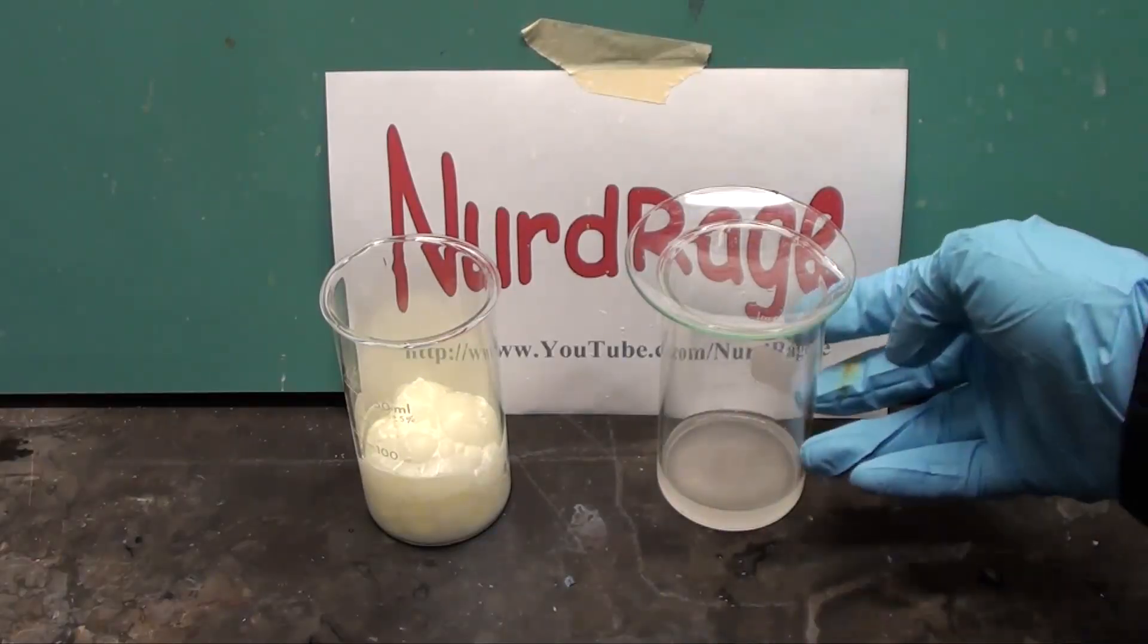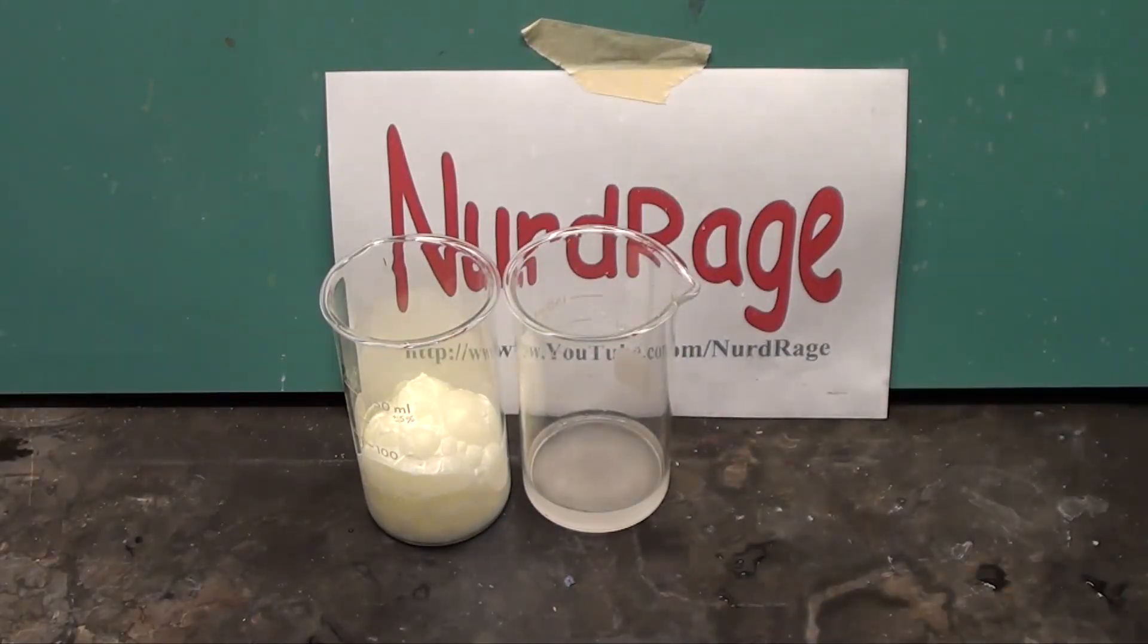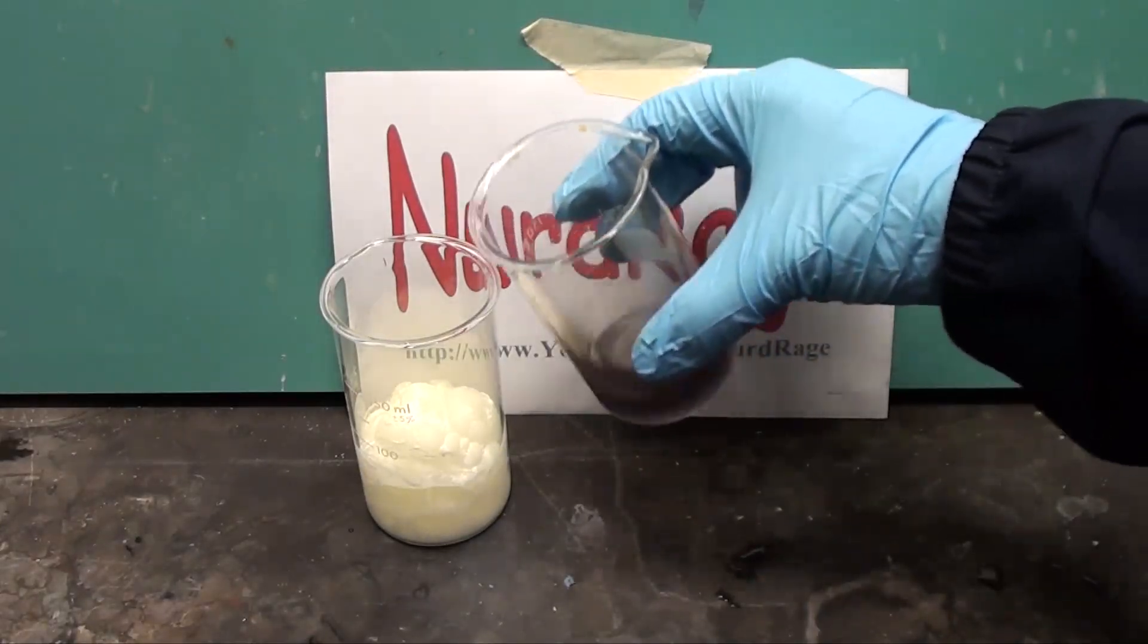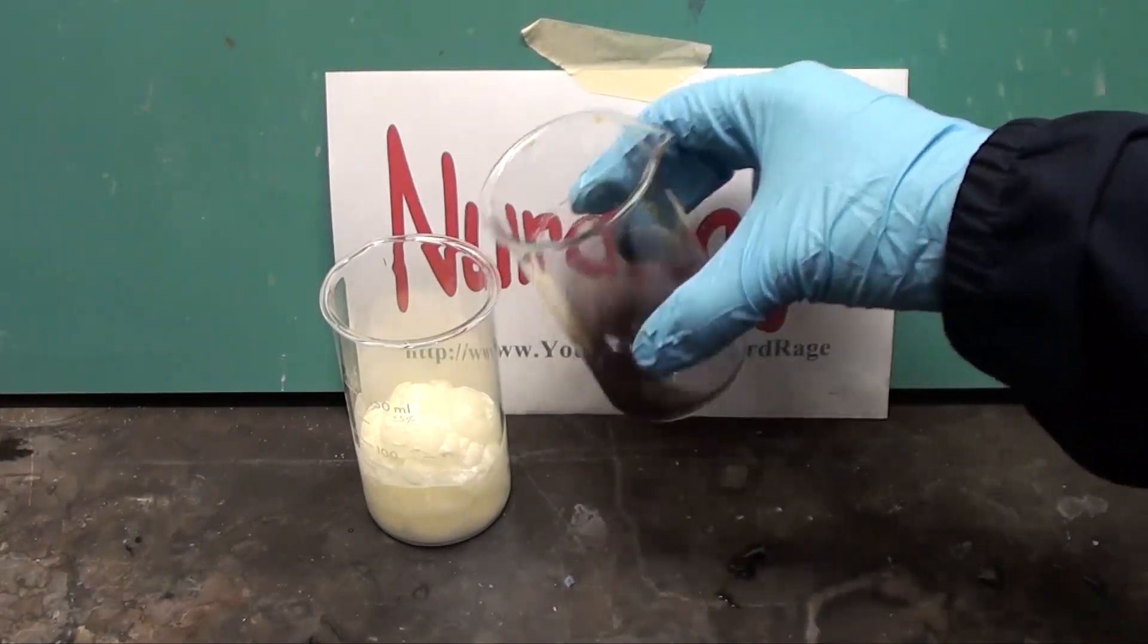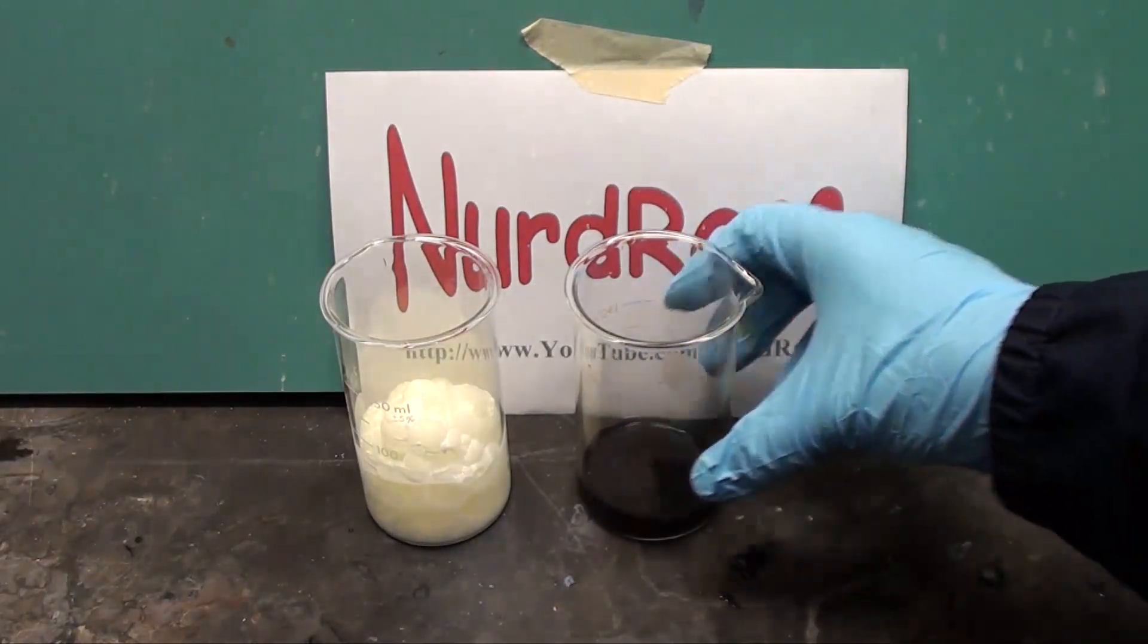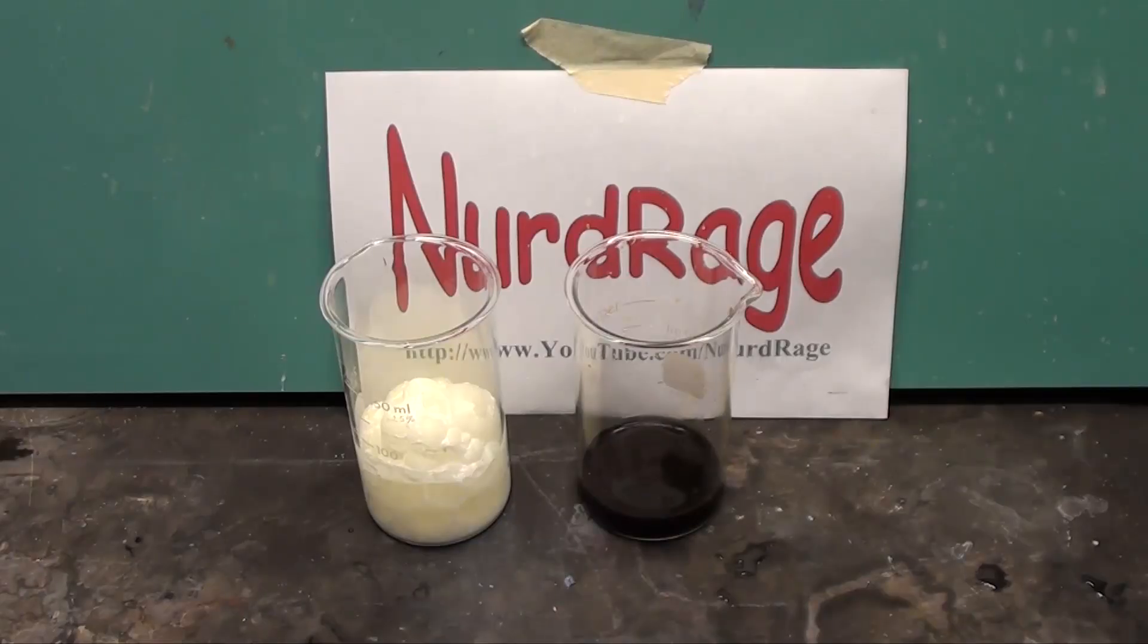Okay, I'm going to go a little further and let some of the chlorine fall into the tester solution. As you can see I didn't even have to pour the chlorine in. Enough is in the air right now to turn the chlorine tester solution dark. I hope this emphasizes again that this experiment must be performed in a fume hood.